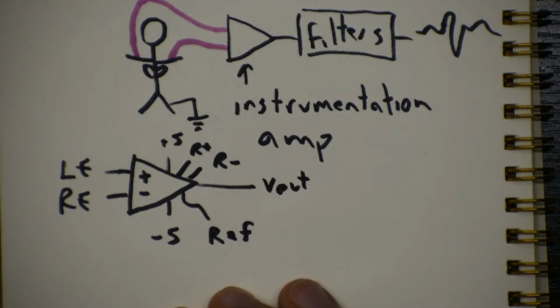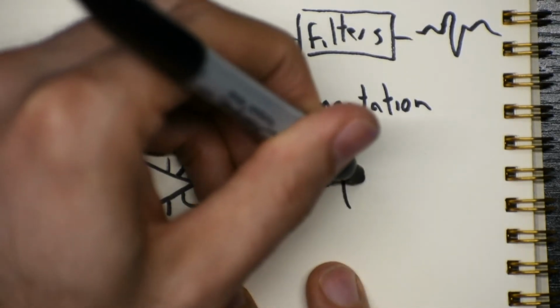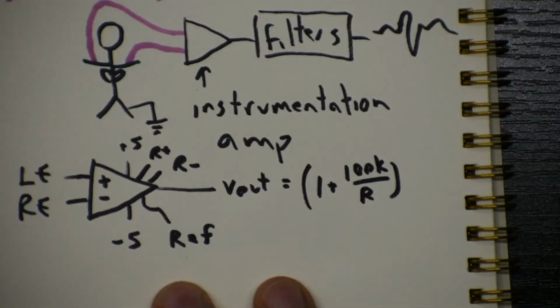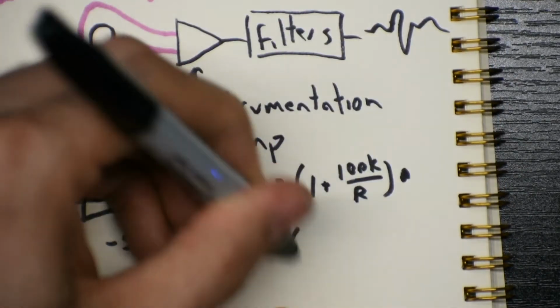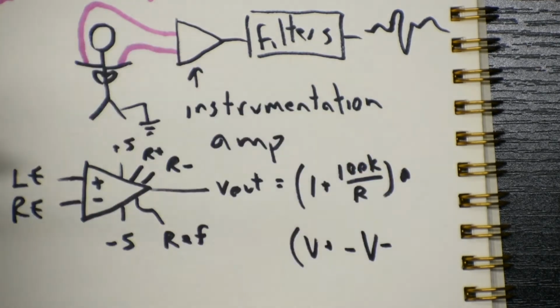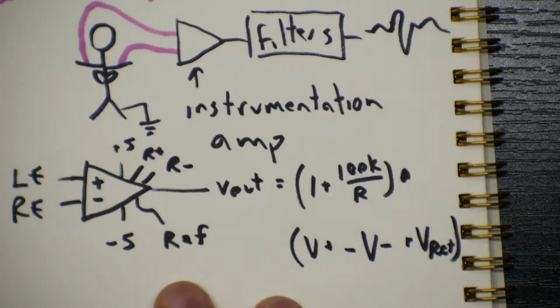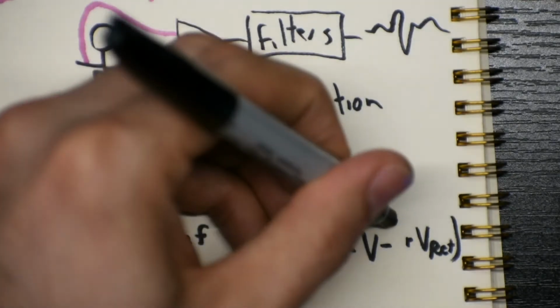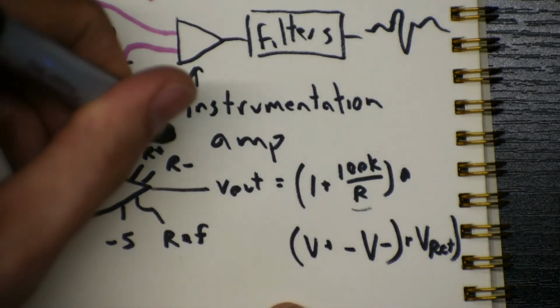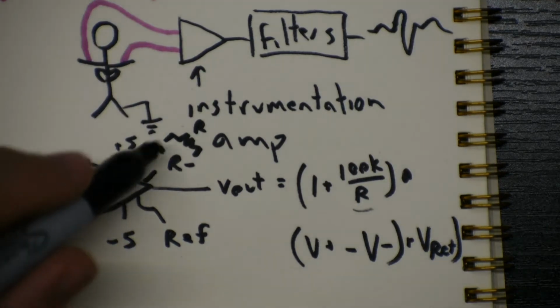So in this case, the V out is going to equal the gain, which for this particular instrumentation op amp is 1 plus 100K over R, times the V plus minus V minus, and then the whole thing shifted by ref. Let's see, that happens after the gain. Okay, so our gain resistor, R, is a resistor that goes between R plus and R minus. So there's two pins, R plus and R minus, you put a resistor there, that sets the gain.